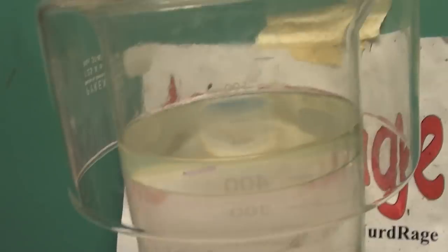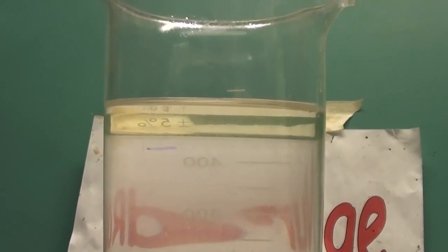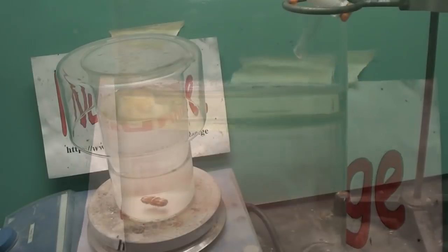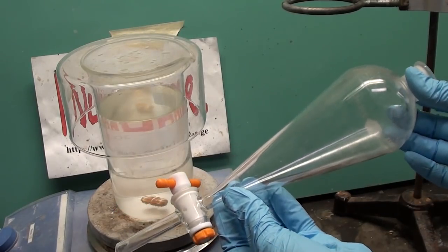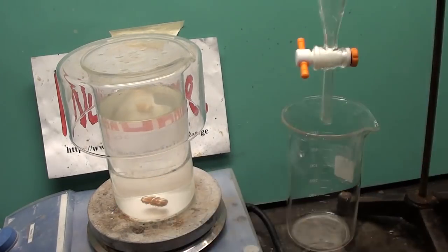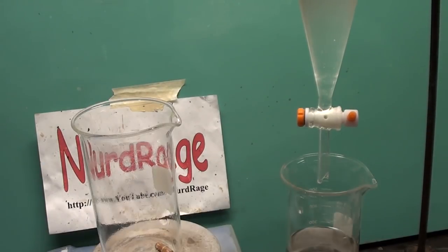Here we are. You can see the layer of methyl ethyl ketazine floating at the top like oil. I'm using a separatory funnel to separate the two layers as the ketazine is all we want. If you don't have one of these you'll have to improvise or very carefully decant the ketazine.